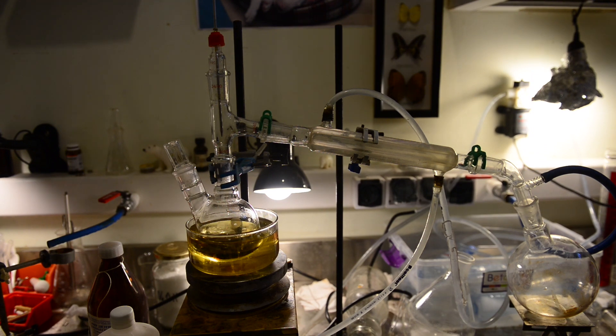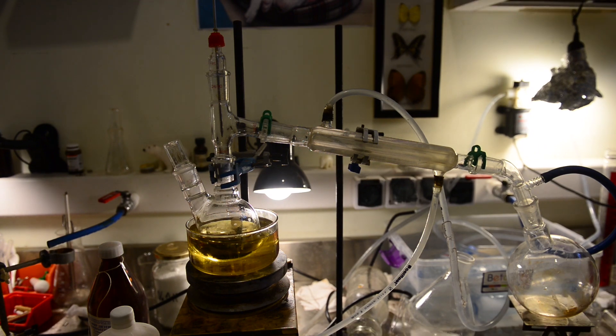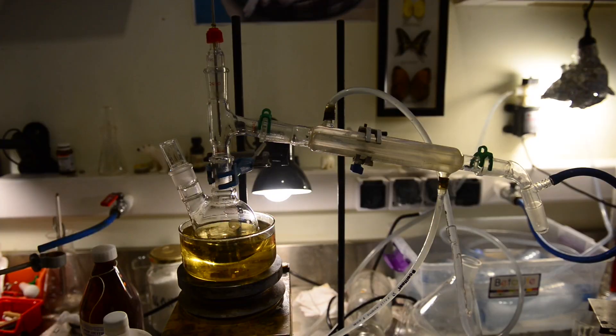The solvent could be perfectly removed with simple distillation, as we can see chloroform distillation is a fast process. I will try to improve my workup in the next run.